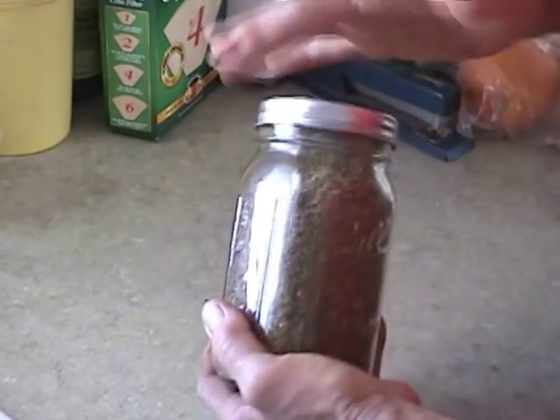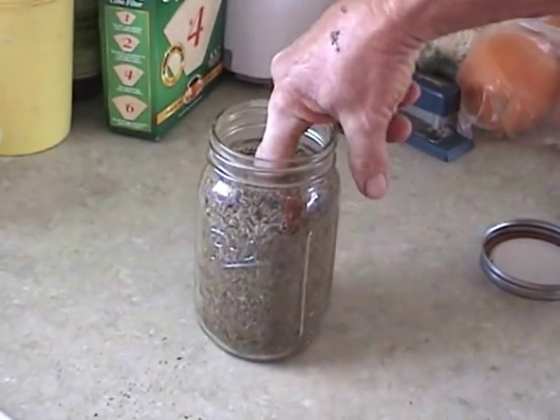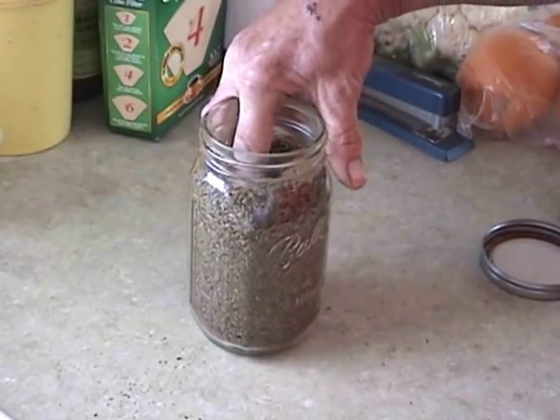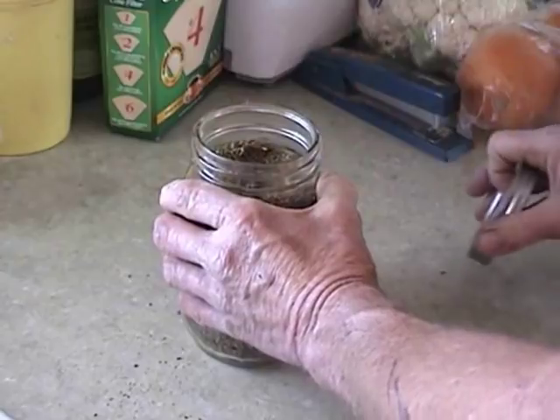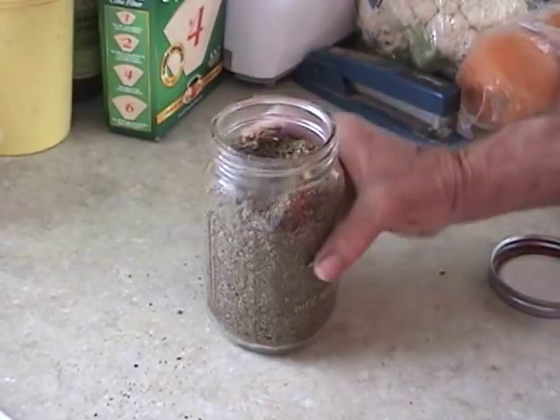I had five jars roughly — I don't know how many ounces that relates to — but five jars that I decarbed first via a method I saw online: put your material in a mason jar, put it in the oven, and insert a thermometer or thermocouple in the middle of a sample jar with the lid off. Bring the oven up to 350°F, run it at 350 until the interior of the sample jar shows 200 degrees. Then you reduce the oven temperature to 220°F, remove the thermocouple, put the lids on the jars, and let them dwell for 20 minutes at that temperature, then turn it off and take it out. So this material has been exposed to that process.